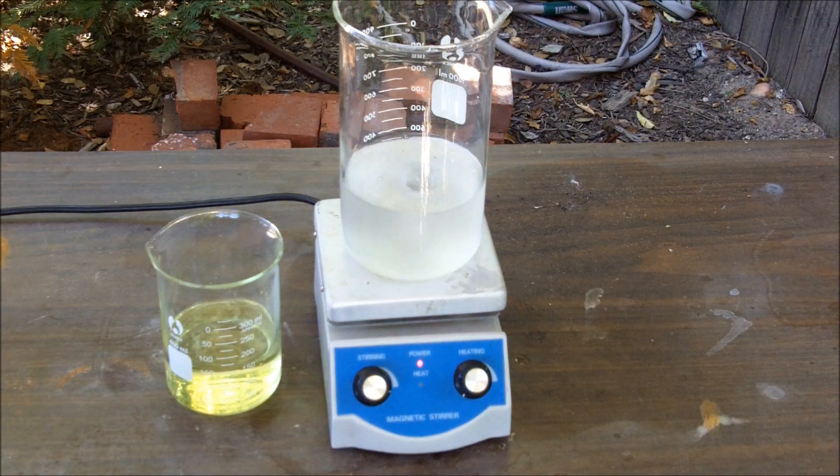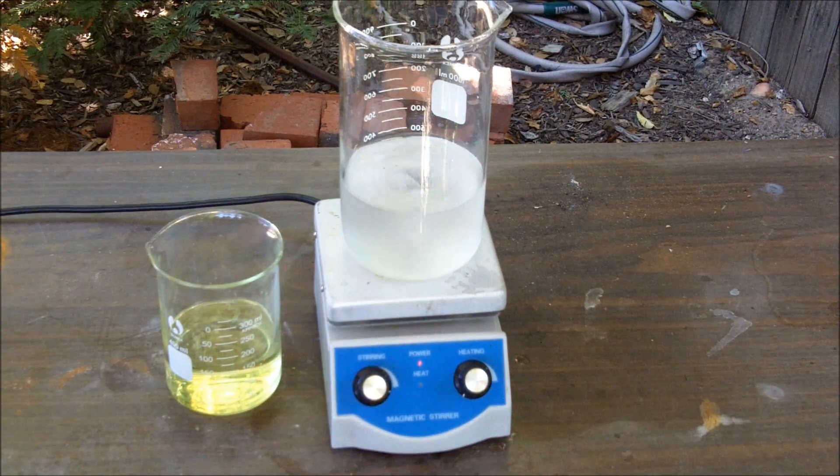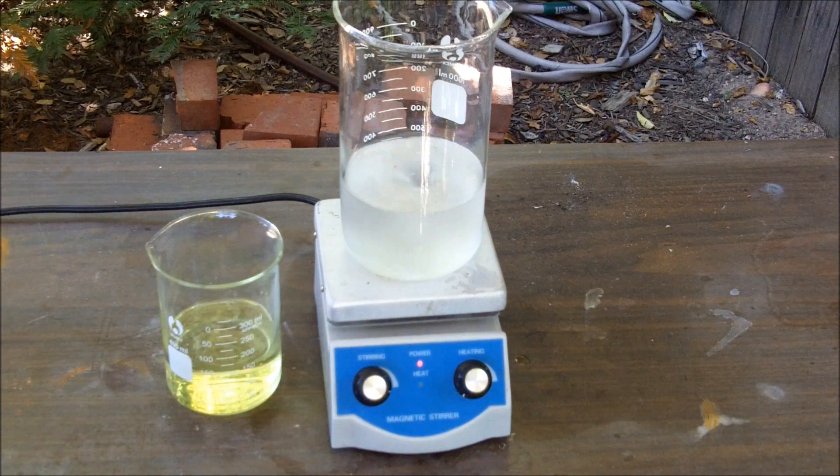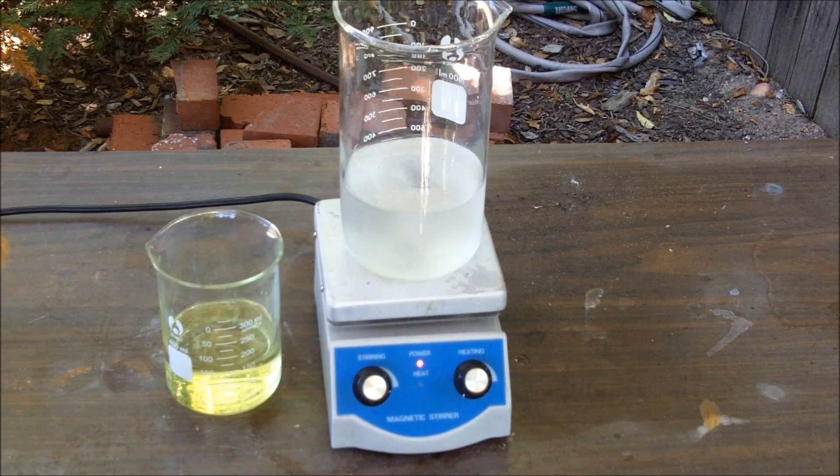And when I do this off-gassing is going to be observed, this is mostly nitrogen. What I am making when I do that is methyl ethyl ketazine, which I will later convert to hydrazine sulfate.